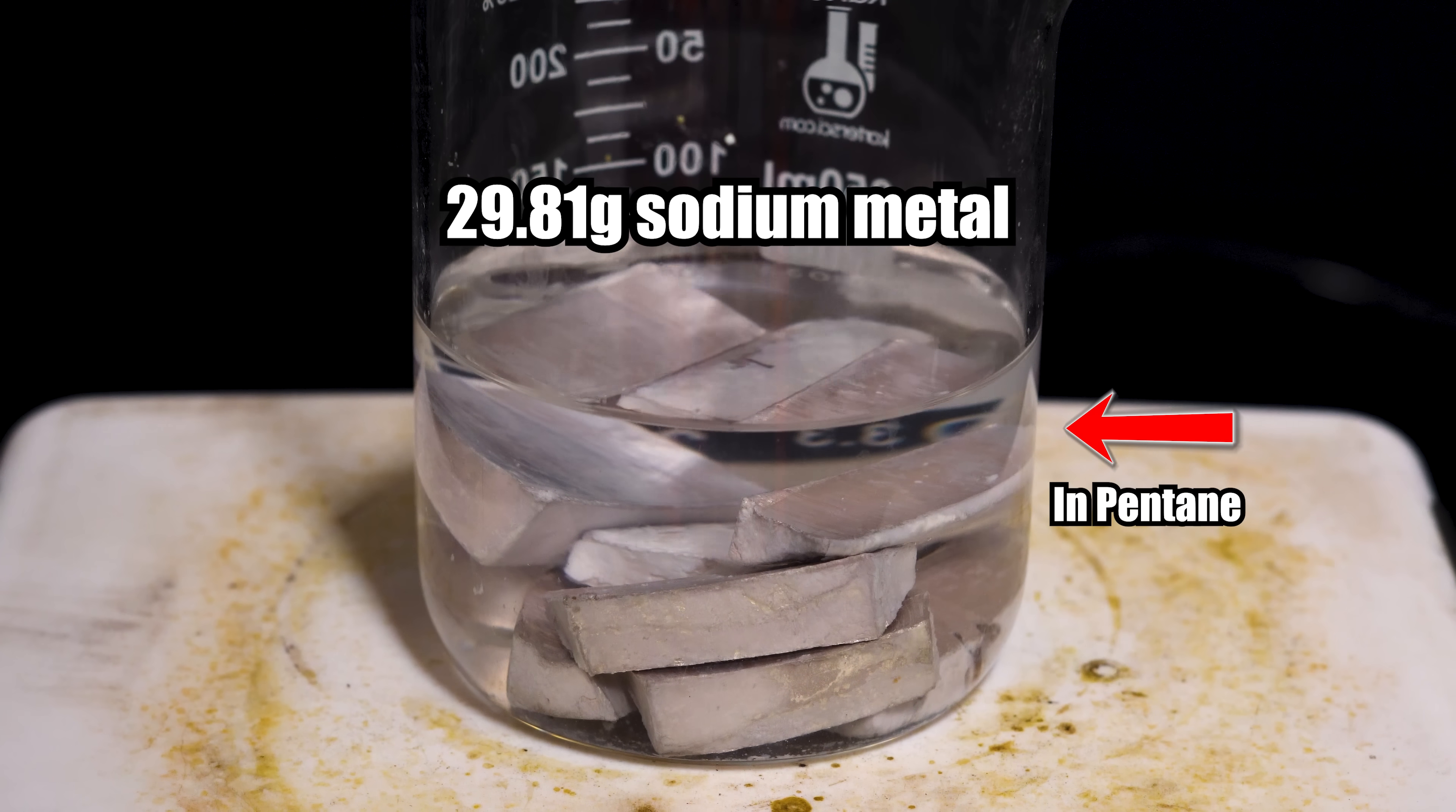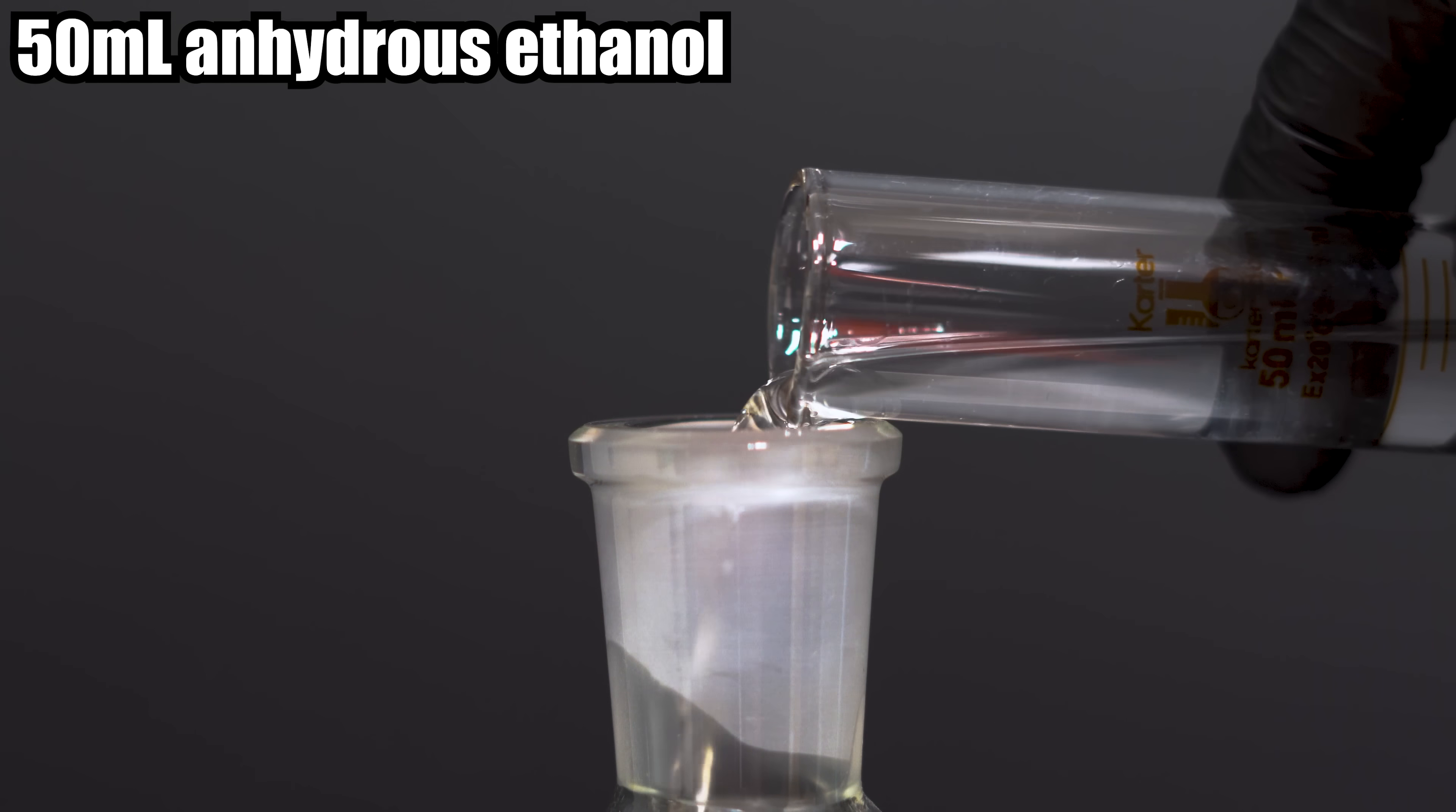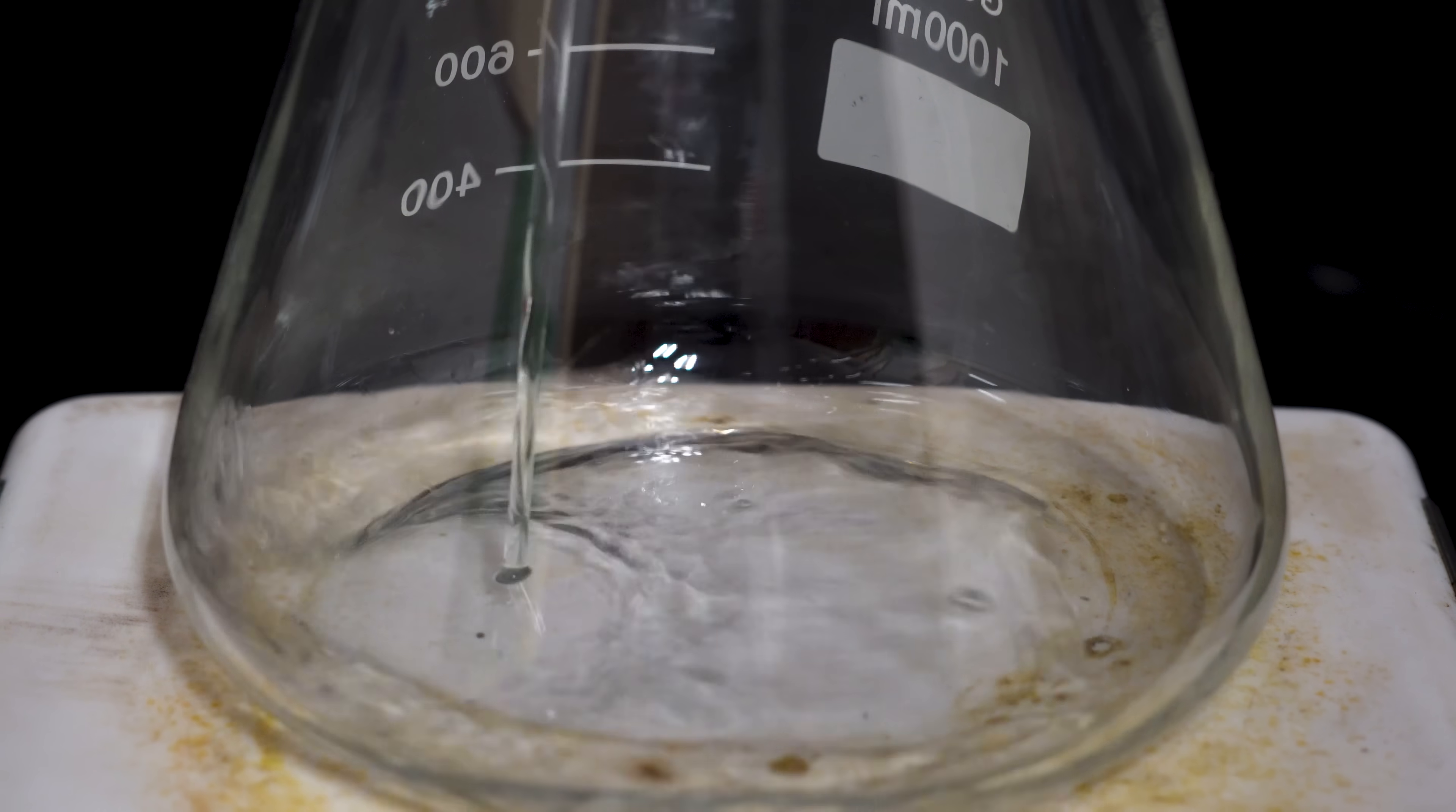He suggested that we use sodium ethoxide as the base and I think that's a pretty good idea. This way, it would just make ethanol and we can distill it out of solution.